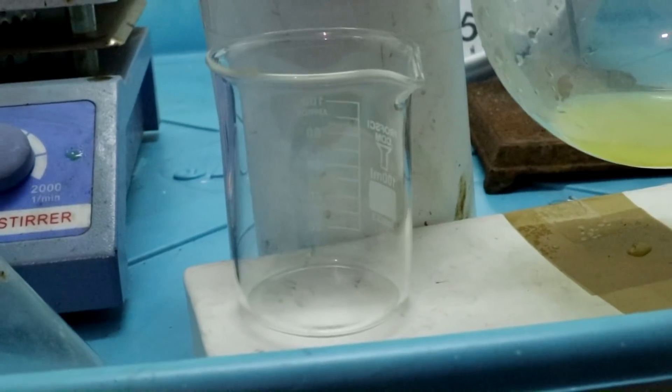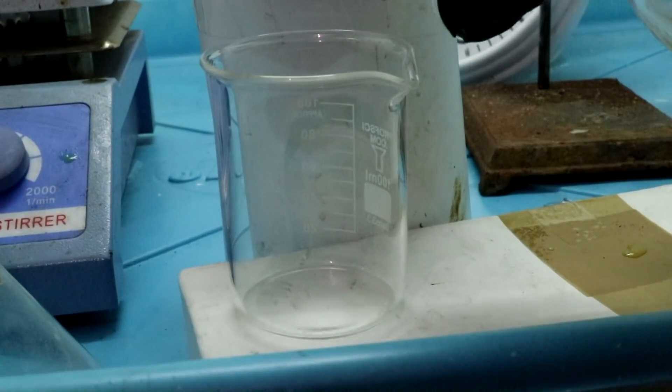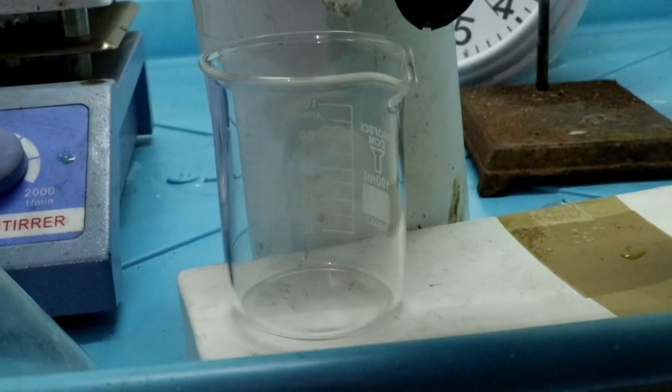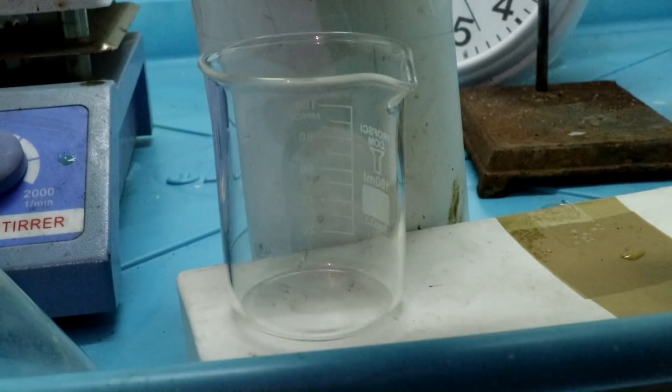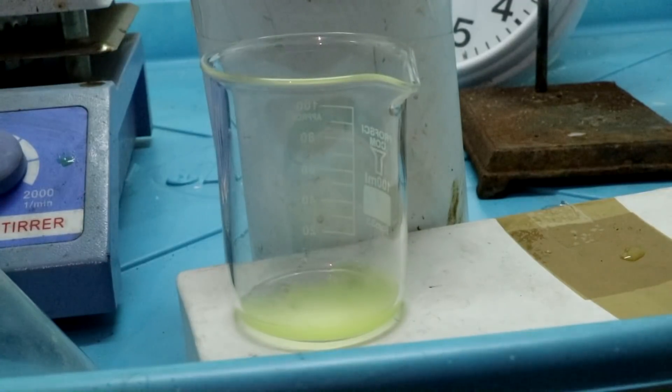But just to check to make sure that we have made what I think I've made, let's add some to a beaker. Just a little bit. A few drops. Okay. Now to this I'm going to add some ferrous sulfate.